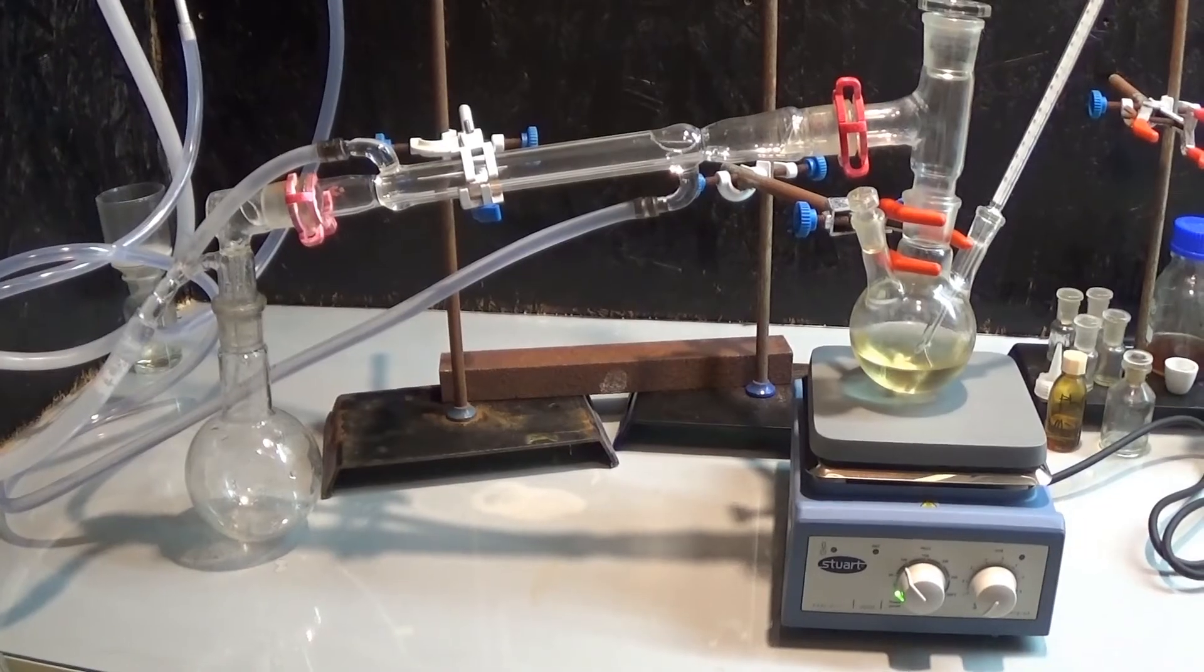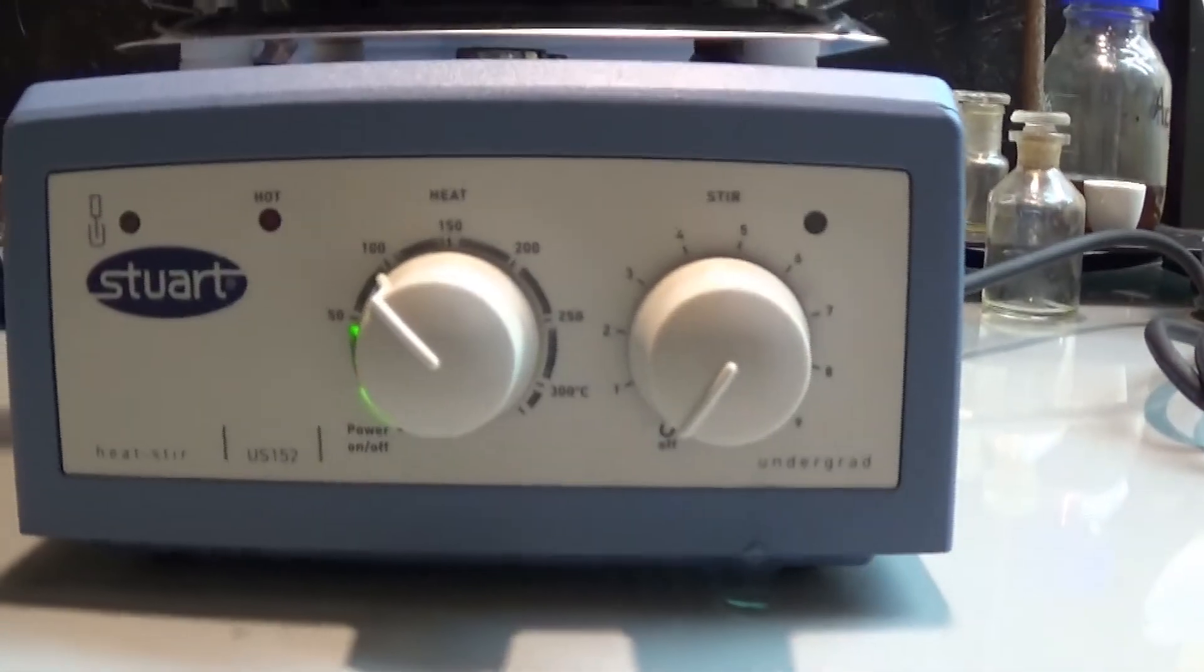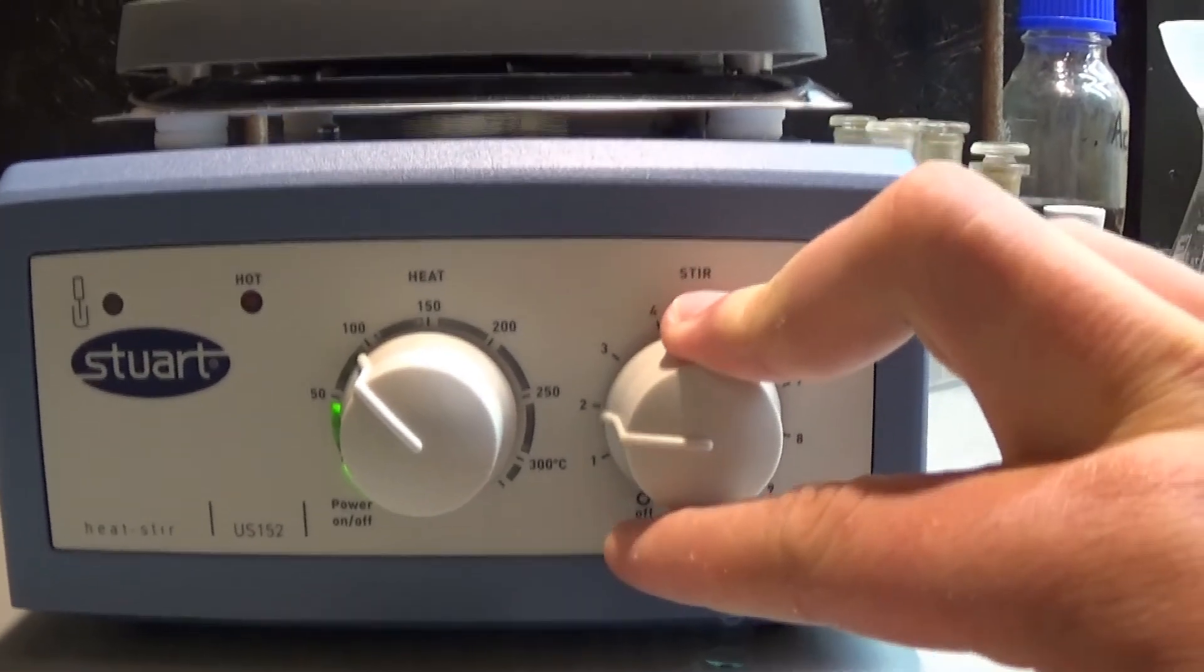So you do not need to add any H2O. Because some of you requested that I let the lab audio in the video, I did it this time. But you can clearly hear the problem, I am always listening to music. For the future I will try to get some music-free shots with lab audio.